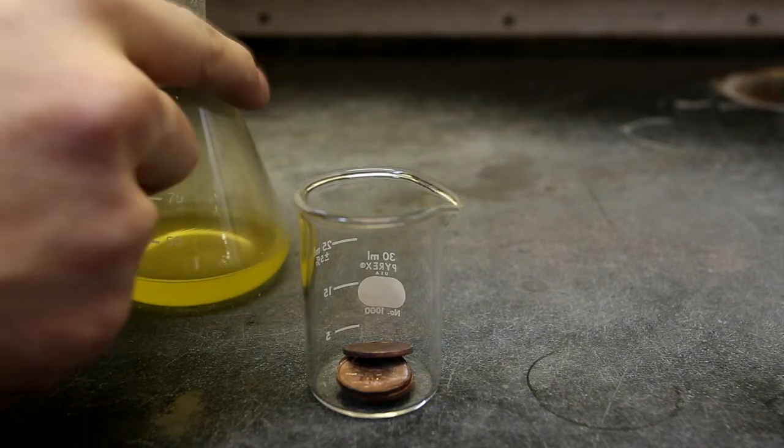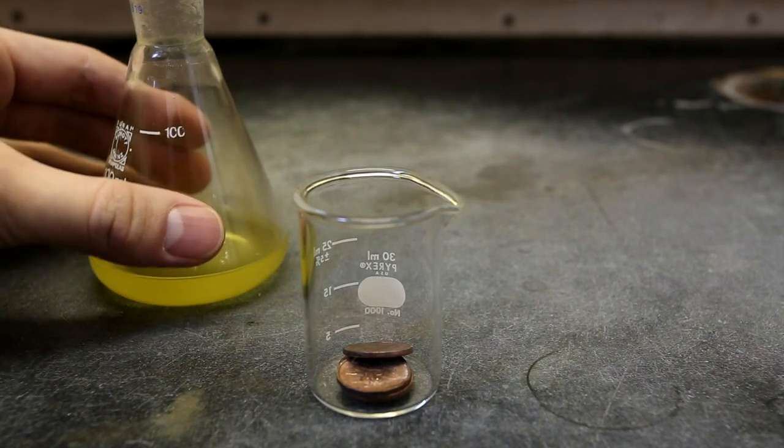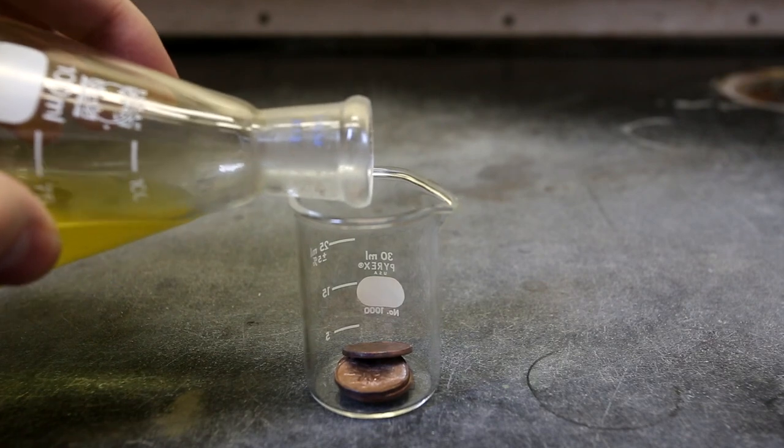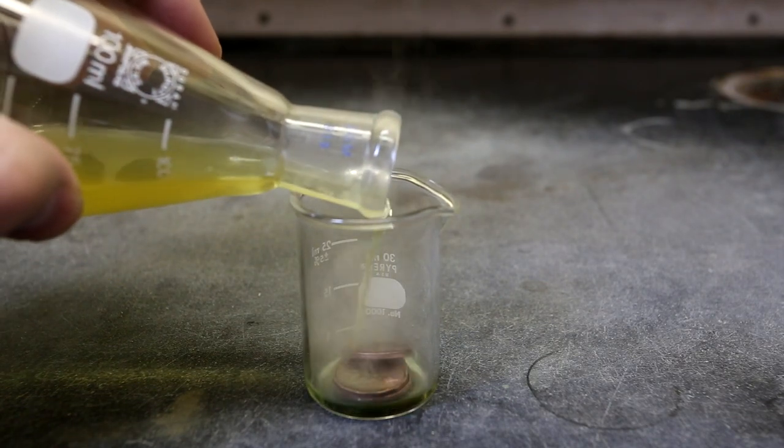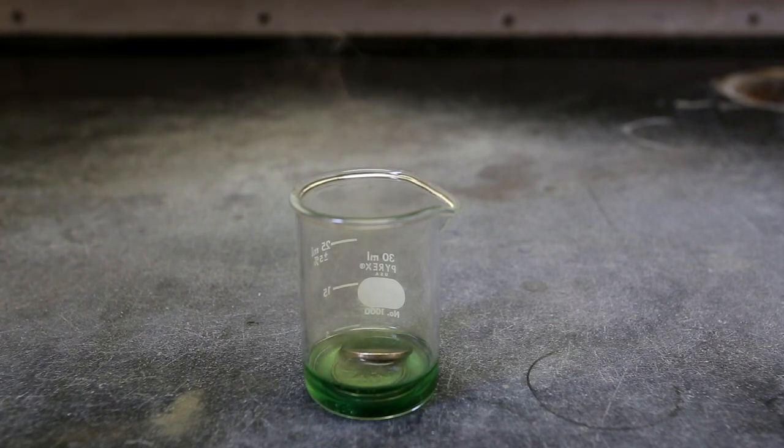To test the nitric acid, I pour it on a couple copper pennies. Nitric acid is one of the very few acids that will actually dissolve copper. However, when the nitric acid is added to the copper, you'll notice that there isn't a vigorous reaction occurring.